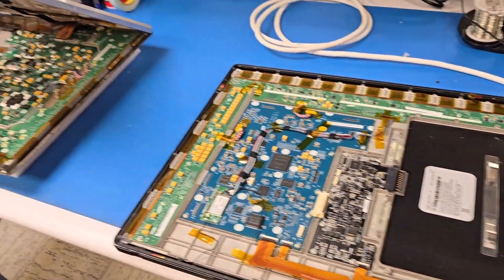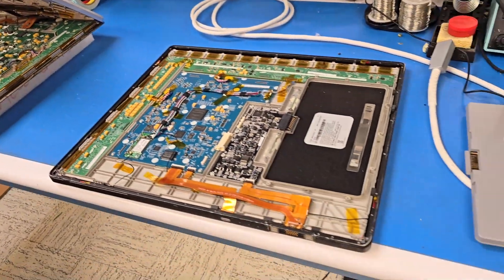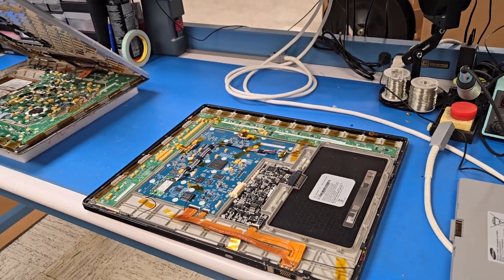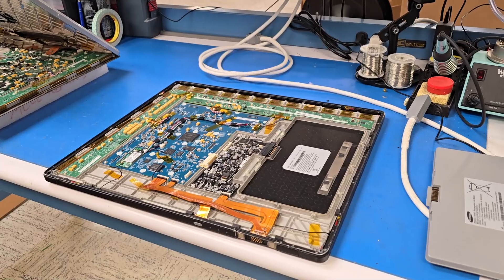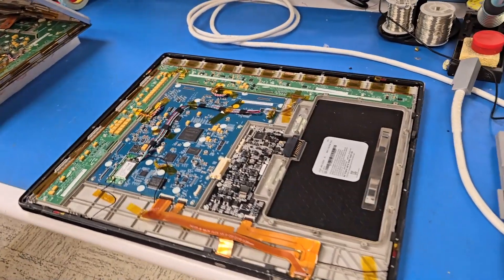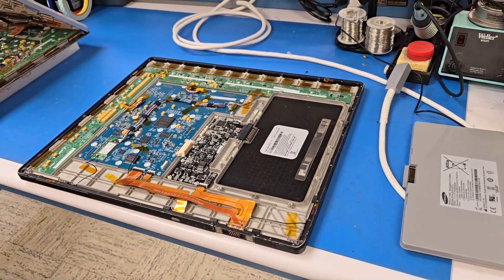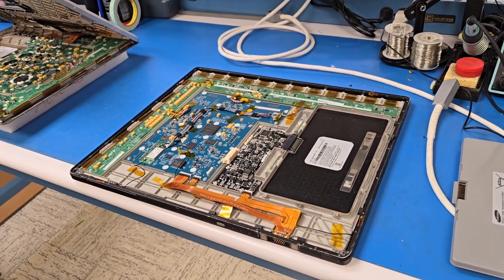Here I have a couple of detector panels — they're opened up. Detector panels are used for digital radiography. They wirelessly transmit an x-ray image to its final processing station or archival storage.